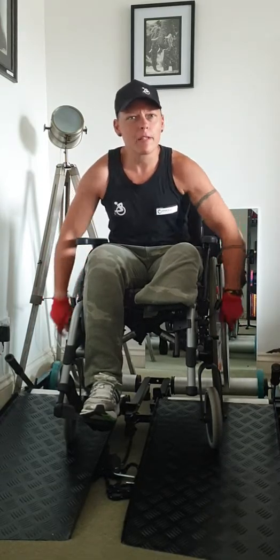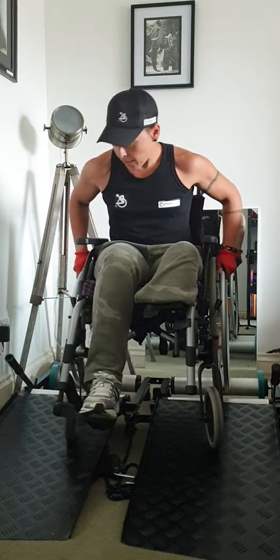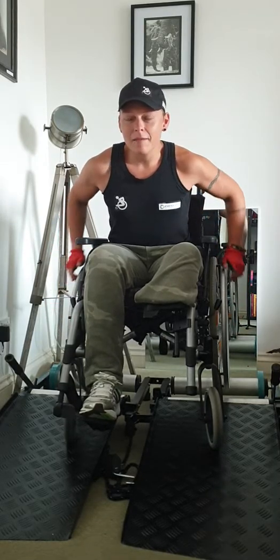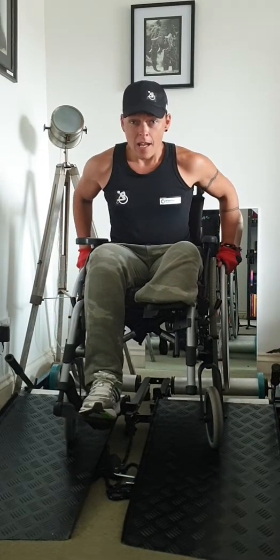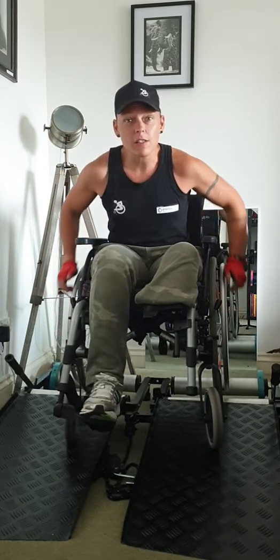It's a lot easier and a lot more fluid than it would be when you're out and about. There's quite a lot of resistance there, mainly due to the fact that my tyres aren't the best. When my new wheelchair comes it will have sport tyres, which I'll be doing the event in and training with for the next nine months, but for now this is the chair I've been using so far.